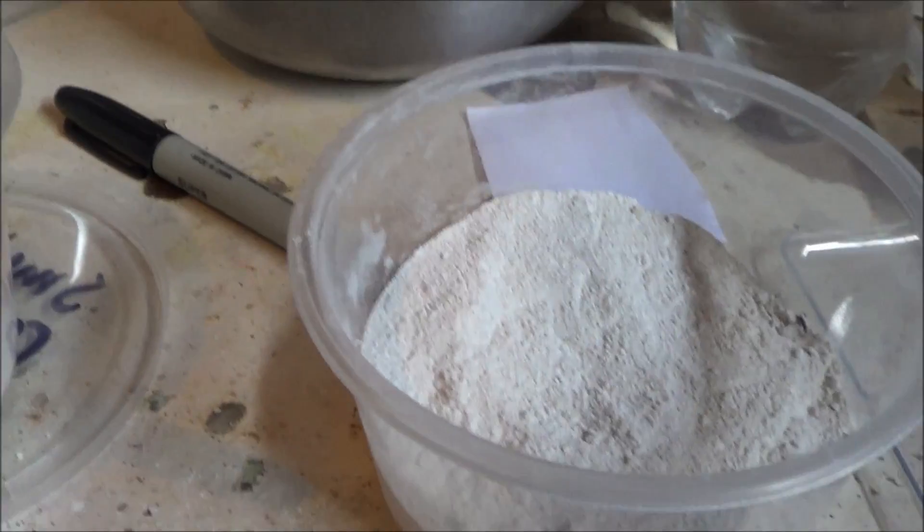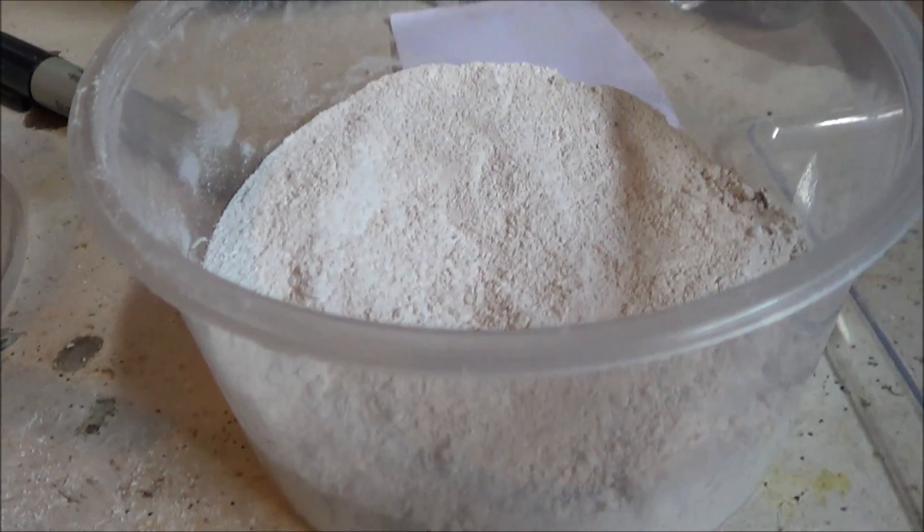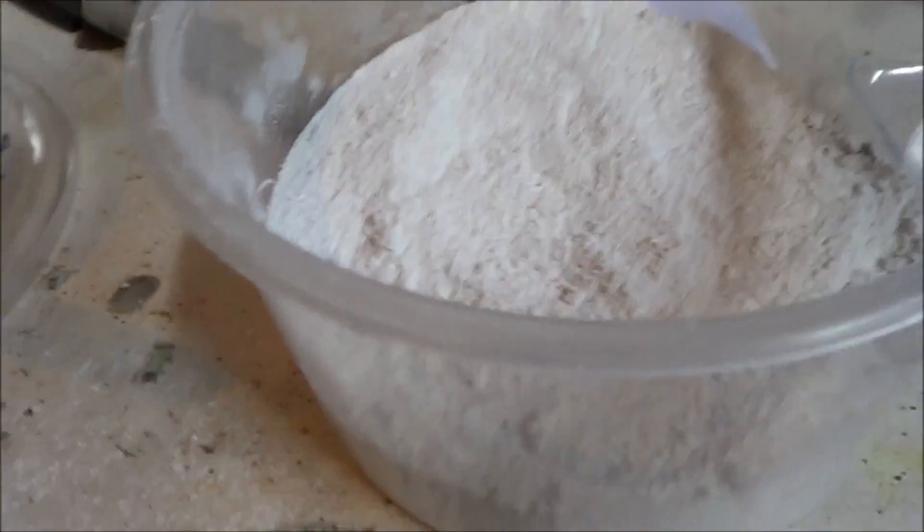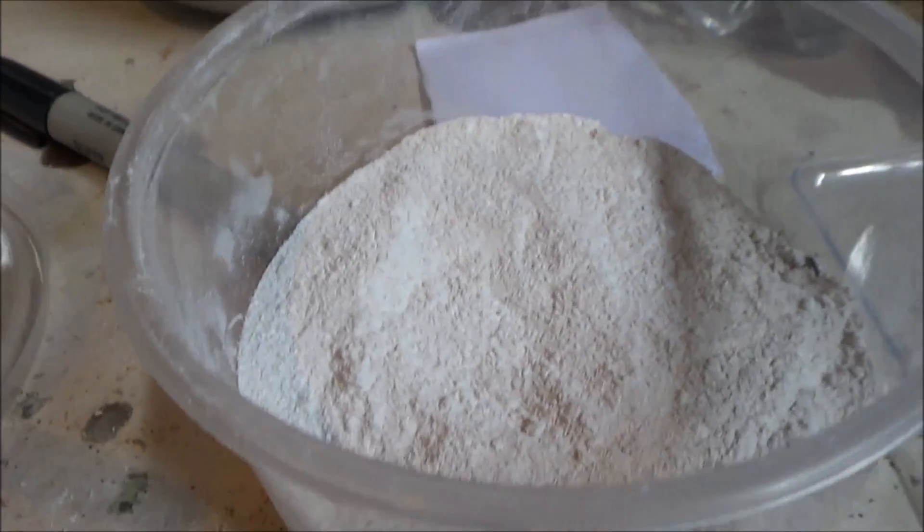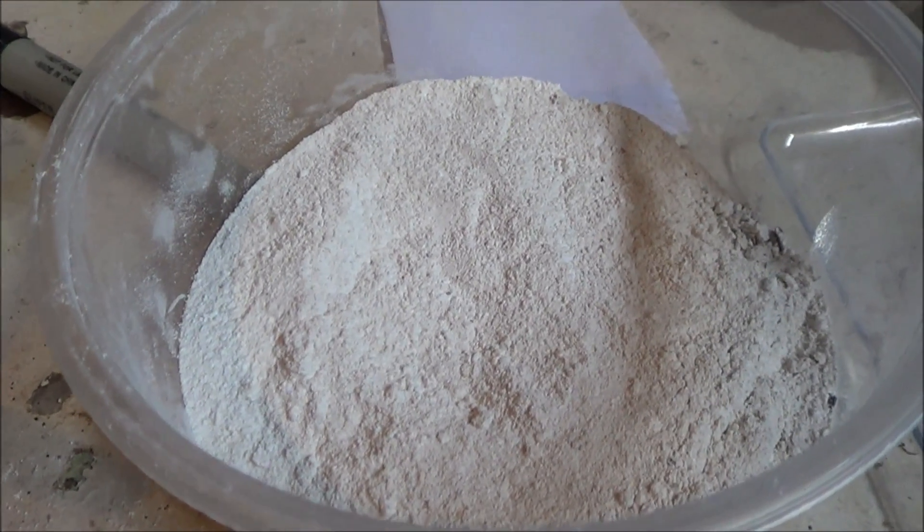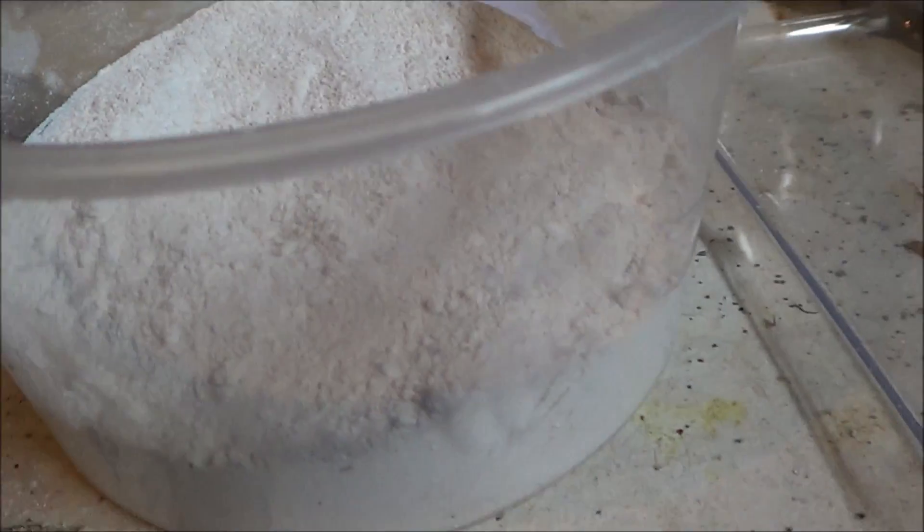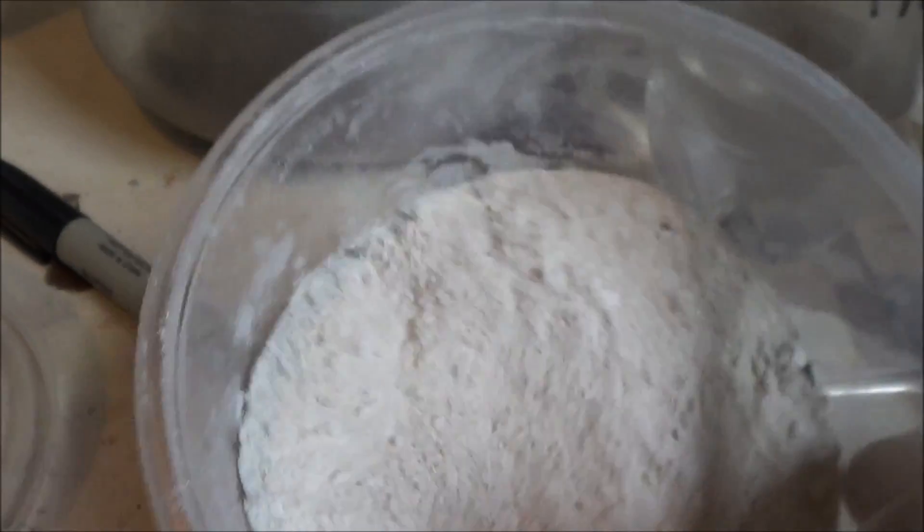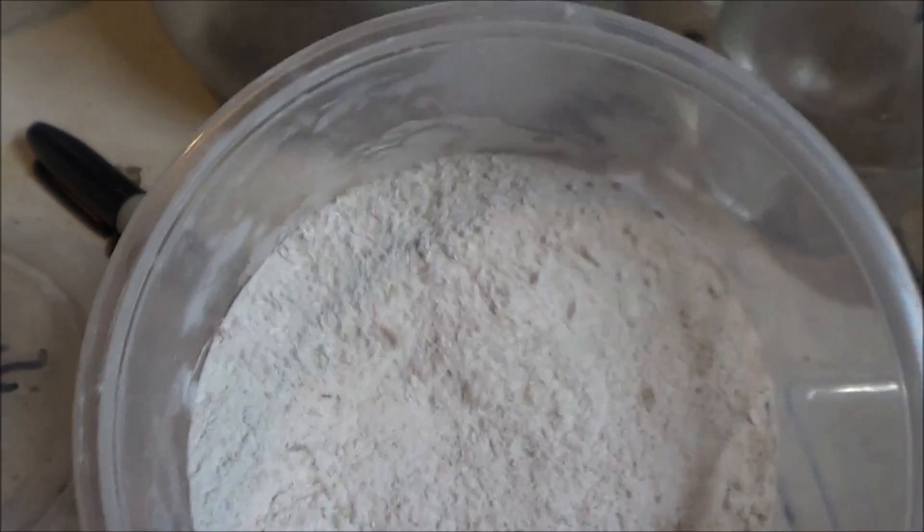So, while it may contain less carbonate, I don't think it contains any cyanamide. So, it's really just some oxidized, unreacted starting product, really. I mean, it probably just contains the whole cyanate still.